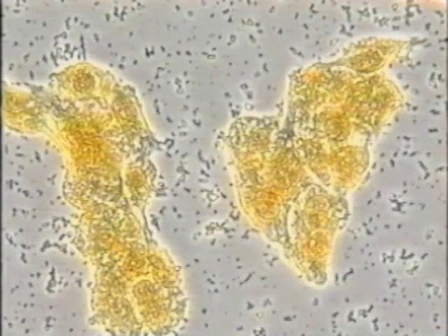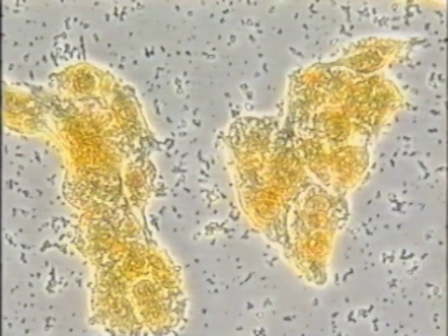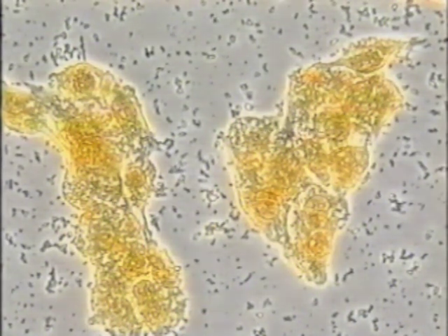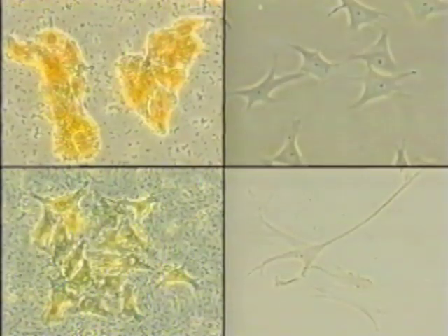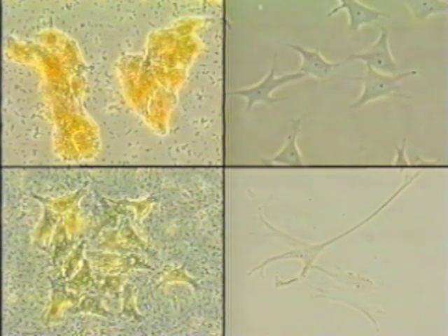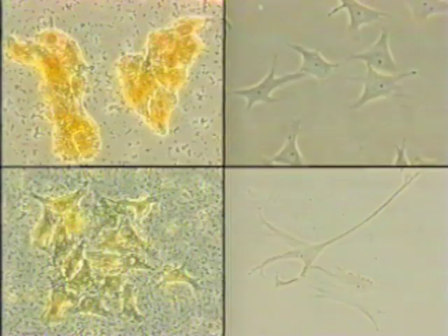Under visible light, nuclei and nucleoli are orange. The nuclear membrane is torn in places. Under UV light, the blue fluorescence of PB100 has clearly decreased, but it remains concentrated in the nuclei. As this experiment demonstrates, PB100 selectively destroyed cancer cells without affecting normal cells.